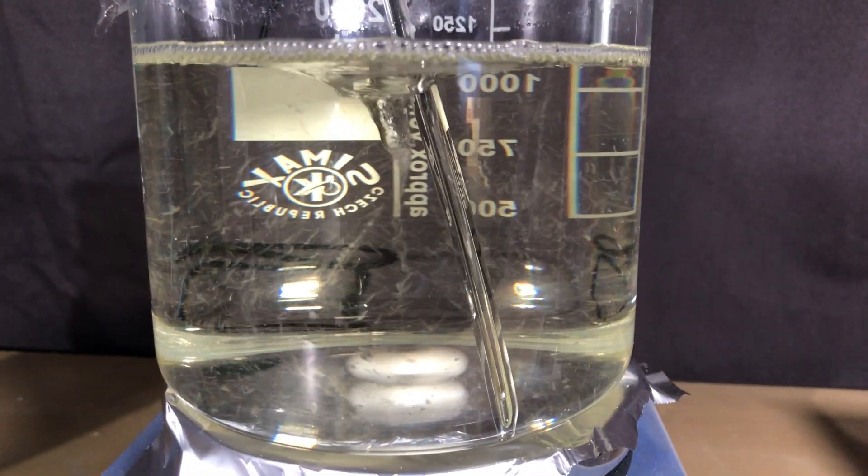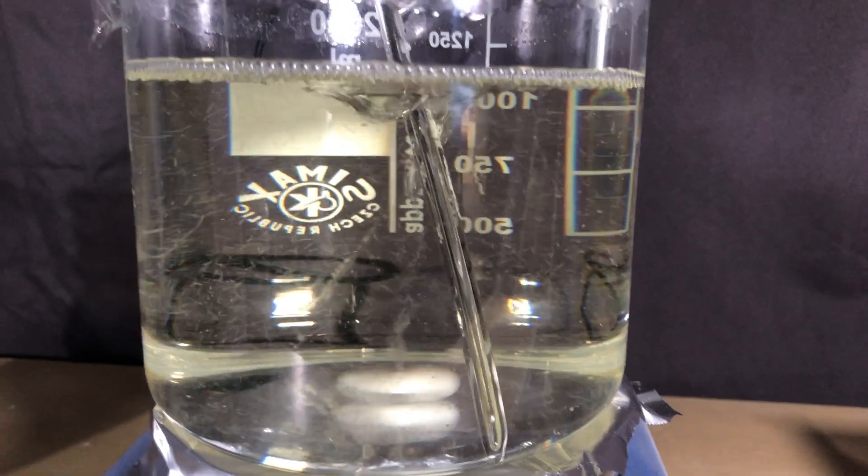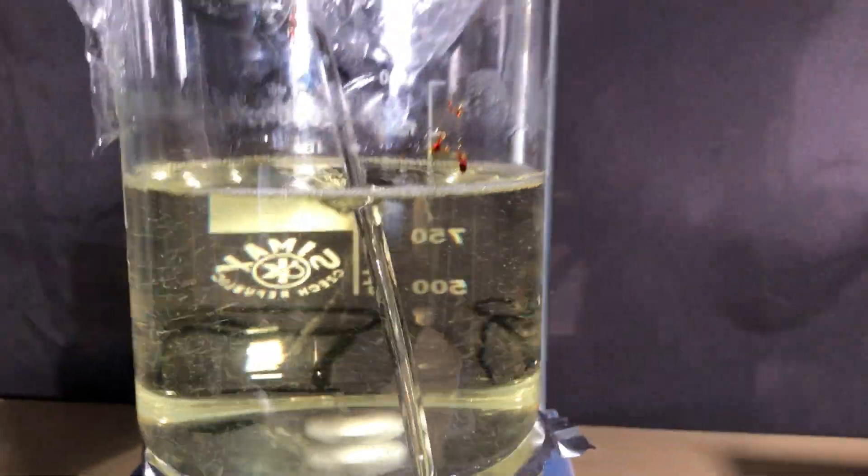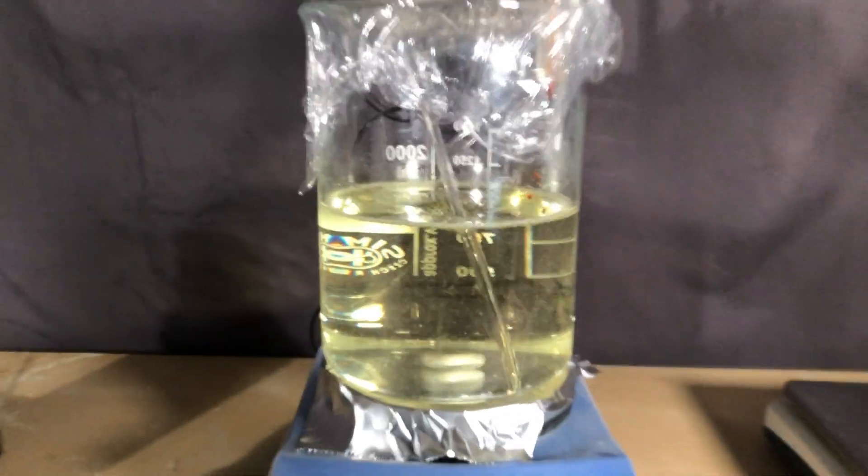The next step is going to be the bromination and to brominate the vanillin we are going to add the bromine very slowly. You want to keep the temperature below 20 degrees celsius because if it gets too hot you get unwanted side products.